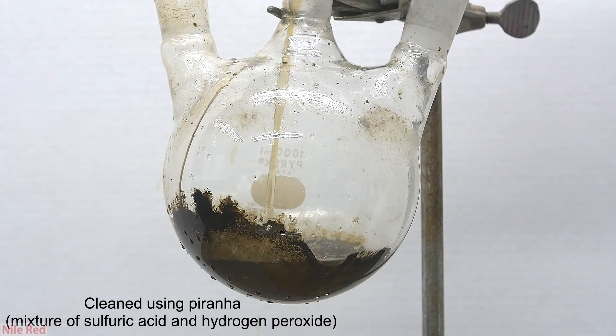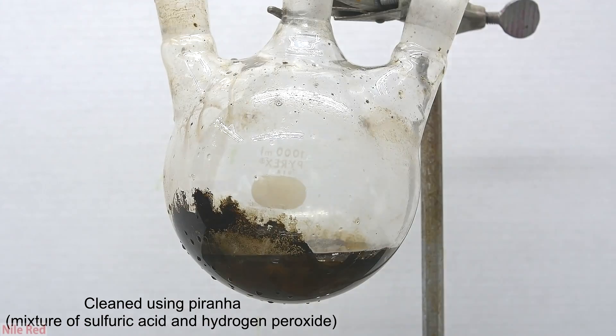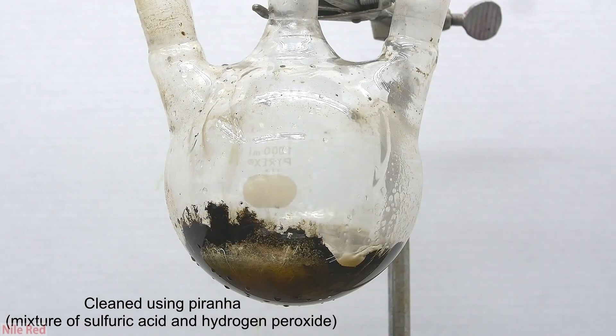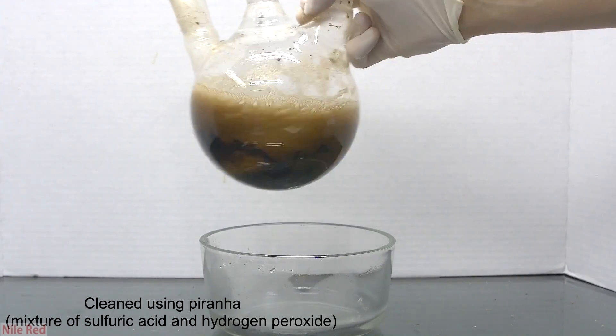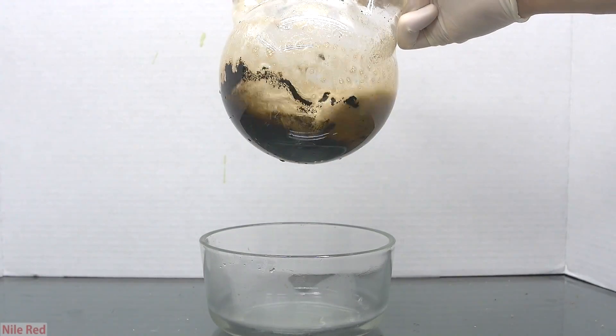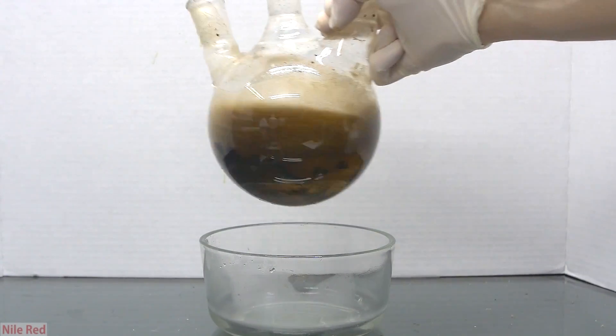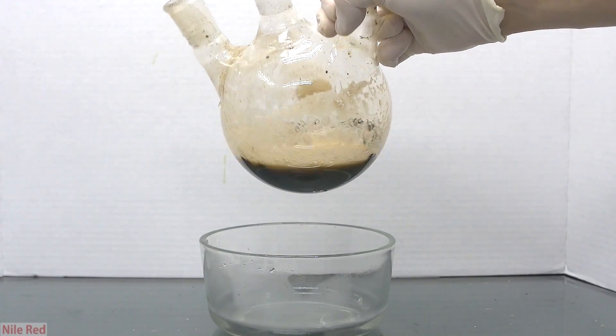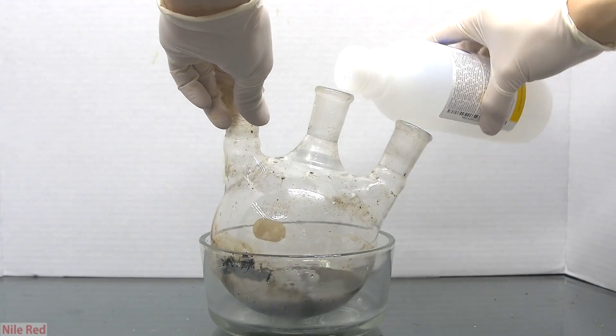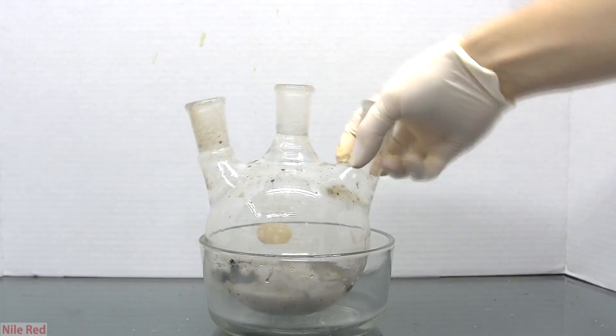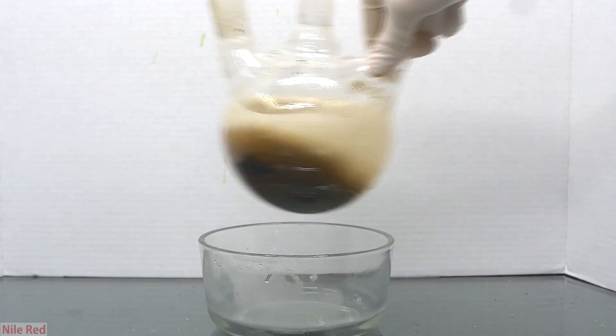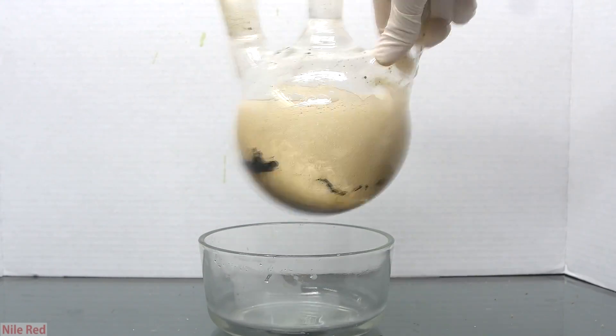To get rid of this, I decided that I would use piranha solution. By mixing sulfuric acid drain cleaner and 35% hydrogen peroxide, we make a very strongly oxidizing solution, which should destroy almost all organic material. After swirling it around for a little bit, and occasionally adding a little bit of peroxide, I was able to get rid of the majority of the black stuff.